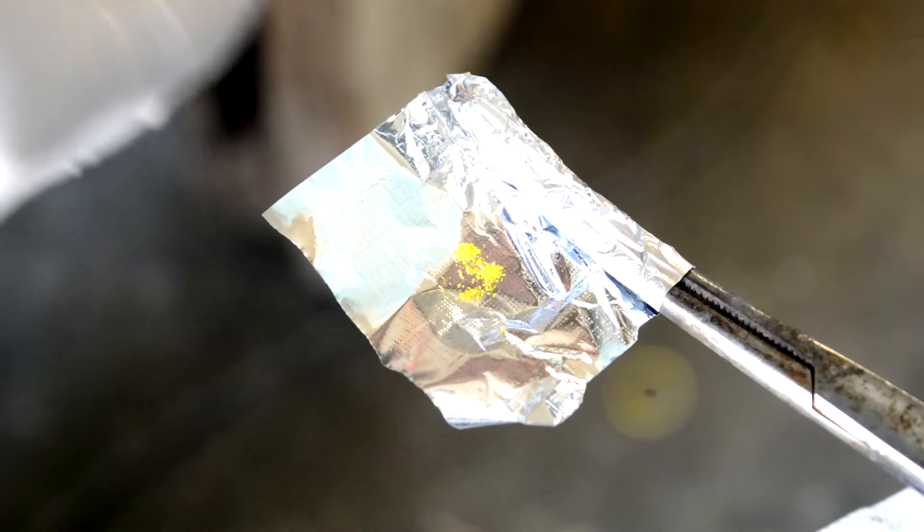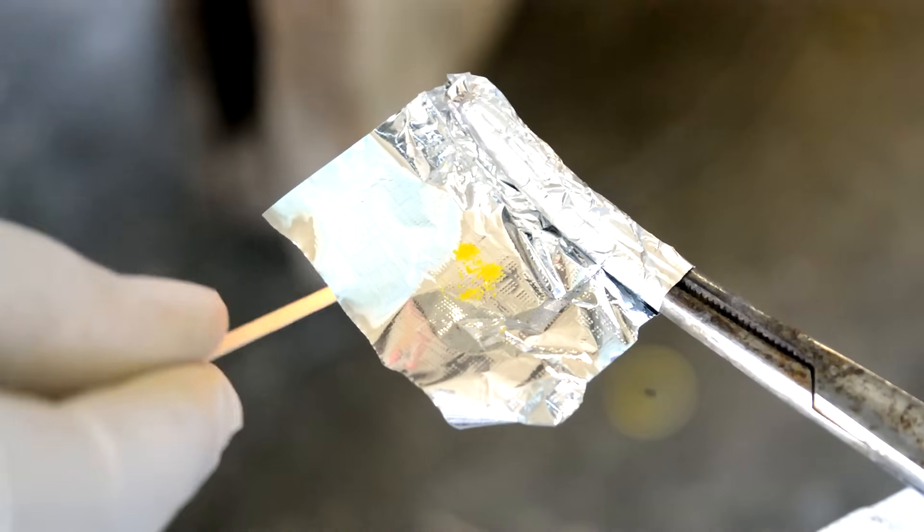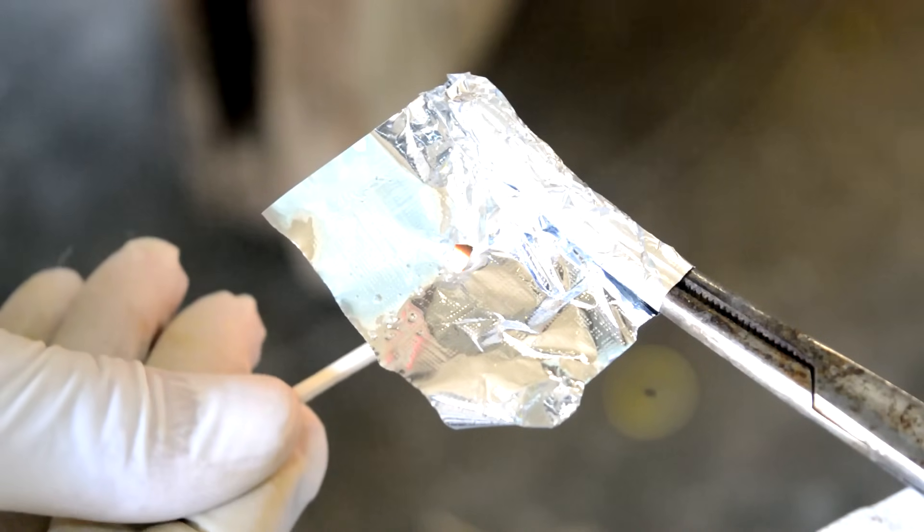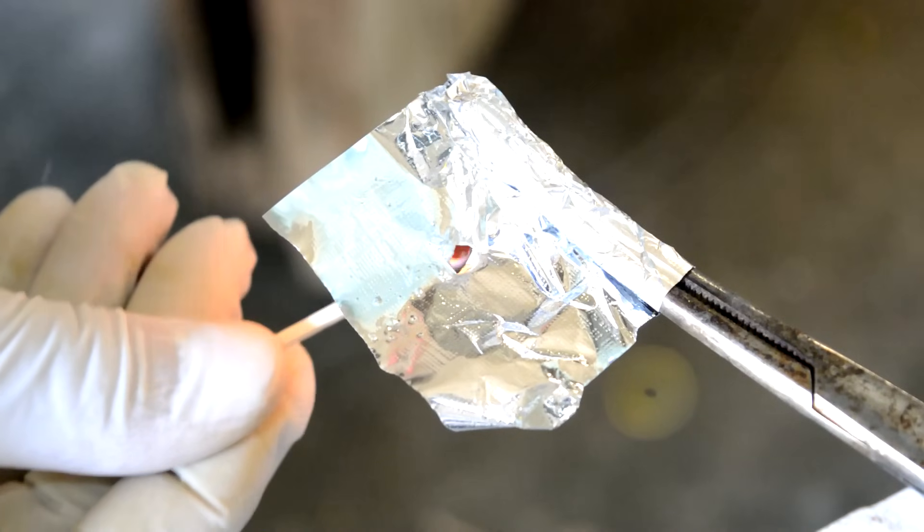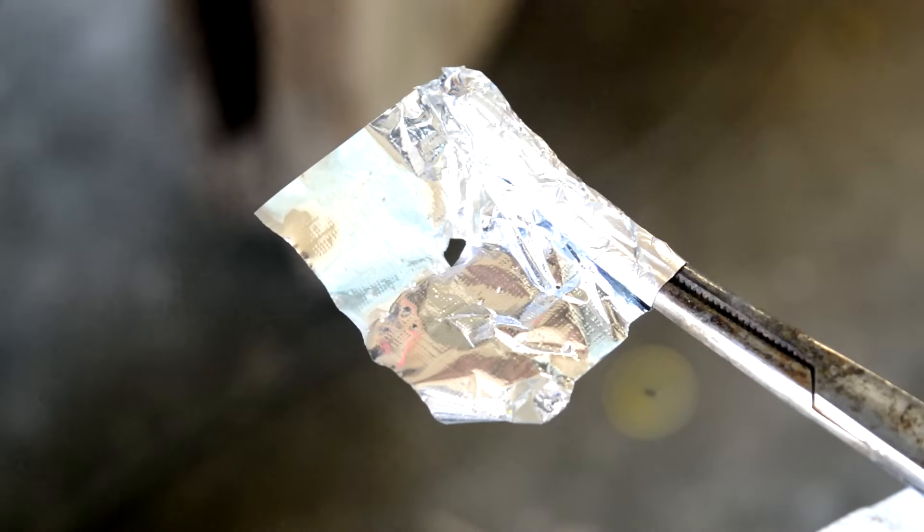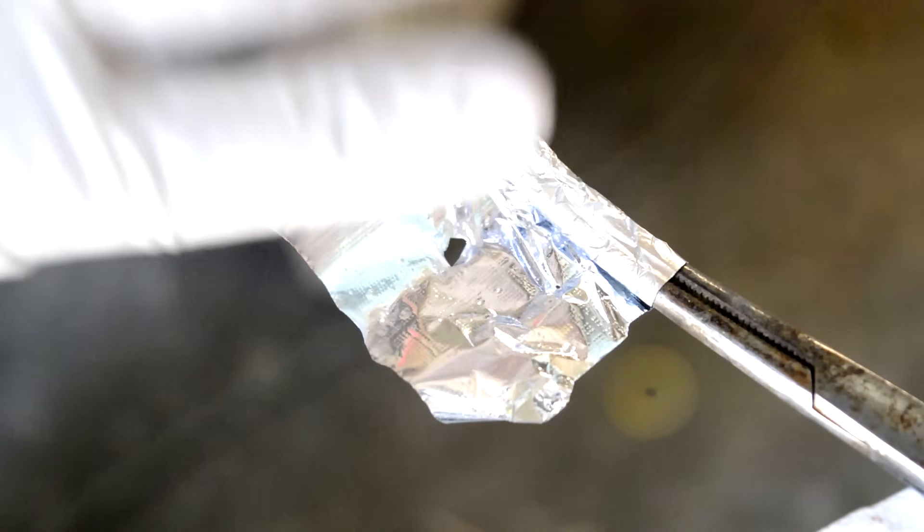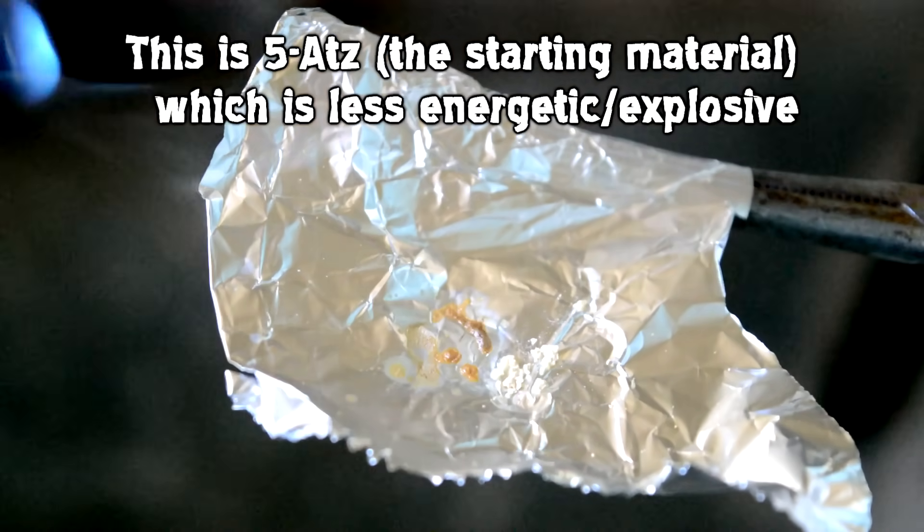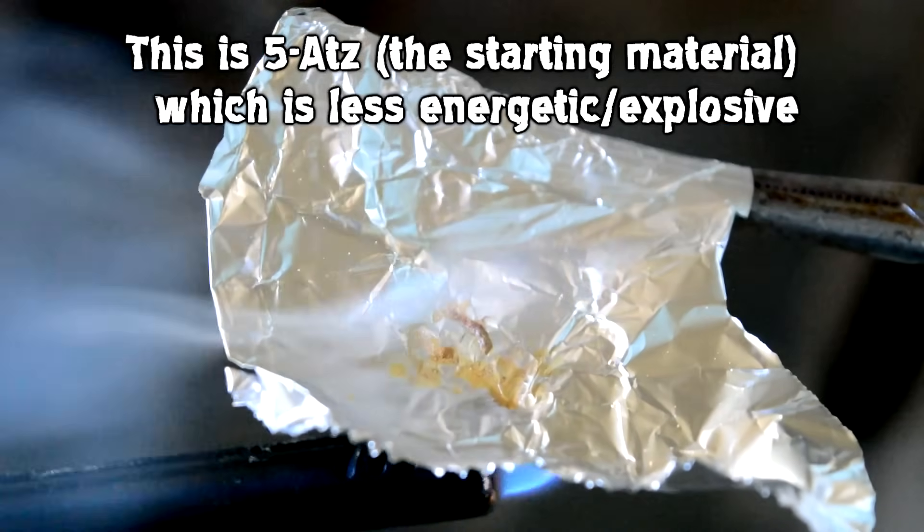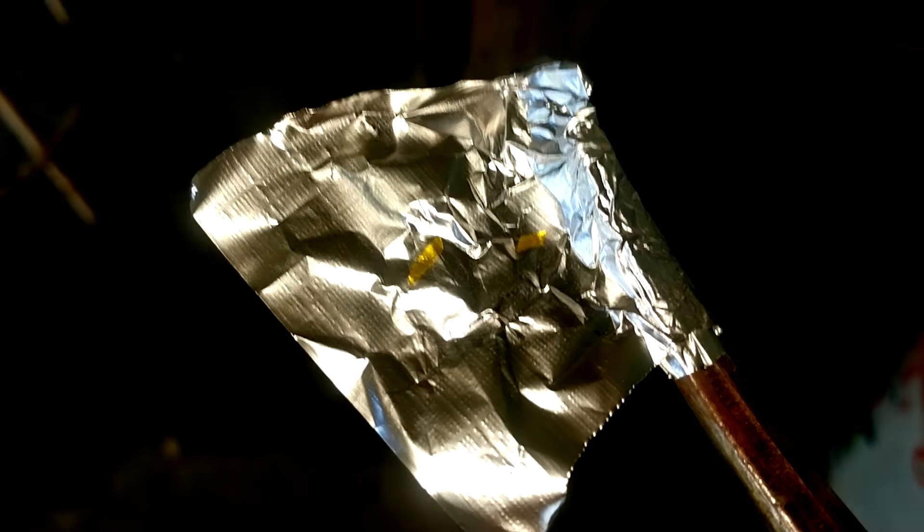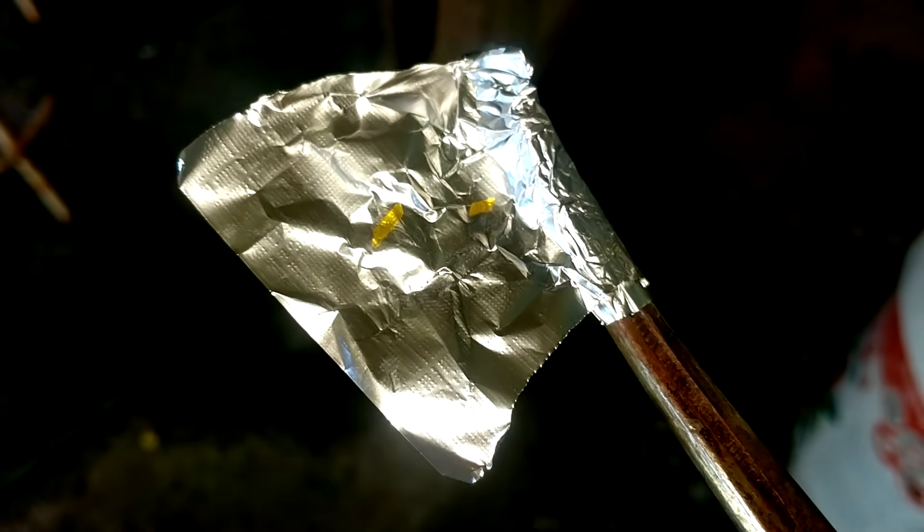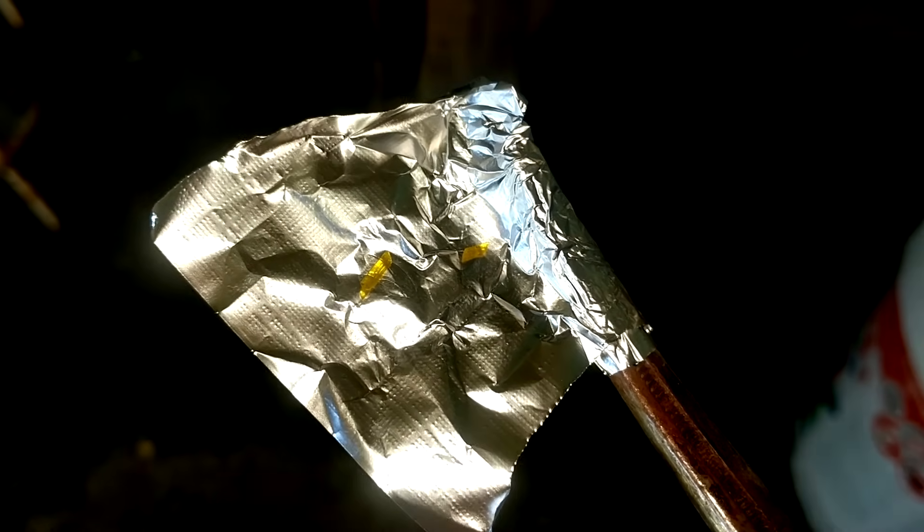As a final product is actually a tetrazole still, we should be able to characterize it a little bit because it should be an energetic compound. So if we heat it we should see something energetic come out of it. That's a little bit more explosive than I thought it was. All right my whole gram suddenly got a little bit more dangerous. That's, it's good to check how explosive your final product is. That's, all right maybe I'll store the product wet until needed, and I shouldn't have grown such large crystals of it. I've never grown such large perfect single crystals of an explosive before for good reason. If I knew it was this explosive then I wouldn't have grown such large crystals. Anyway I'm interested to blow some of these up in slow motion. I've never blown up such perfect crystals before.